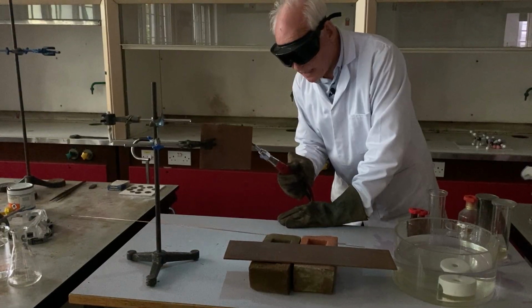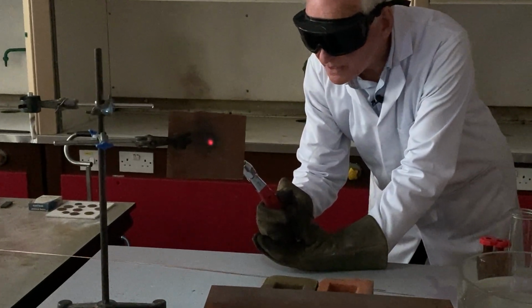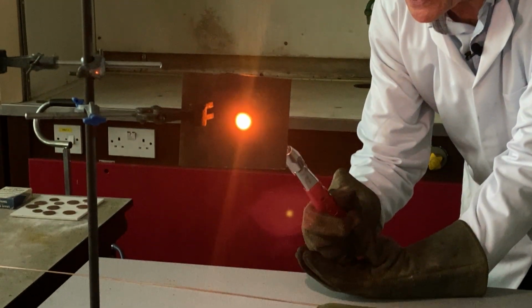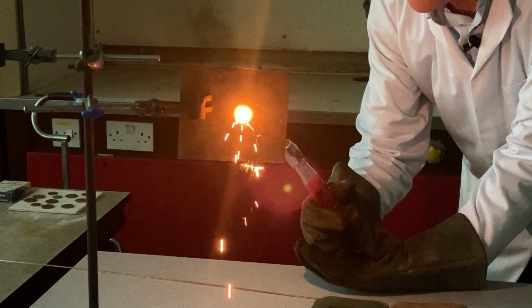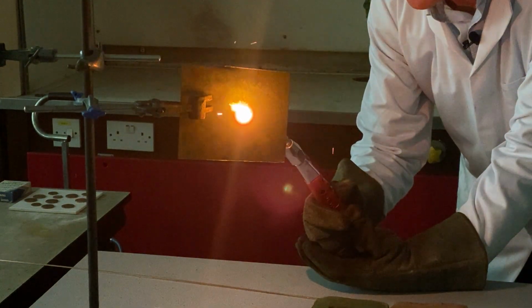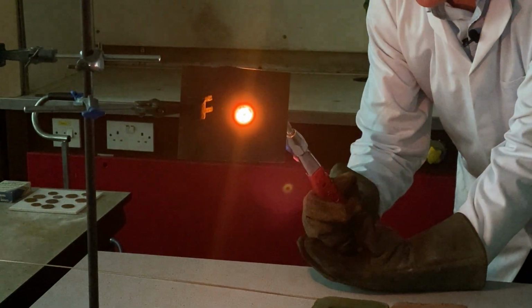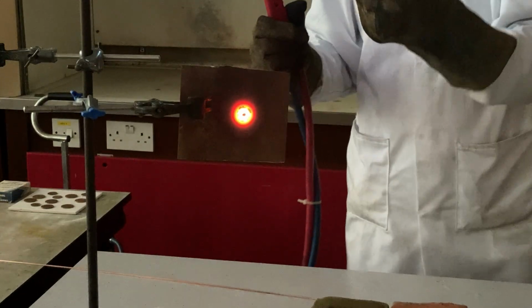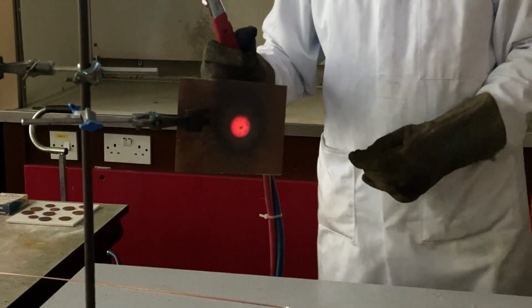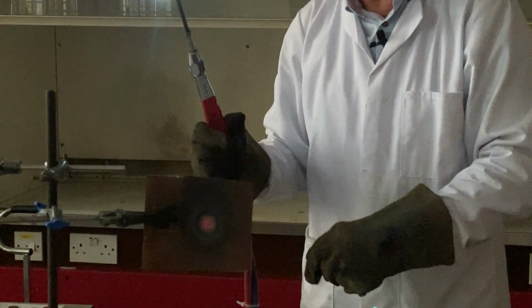Now, I'm going to heat it approximately in the middle, and as I start heating it, I hope you'll see it will start to glow orange. And as it starts to glow orange, you see I've already burnt the hole. There it is. And the hole has come through very quickly indeed. Now those are sparks. The sparks which are coming off are sparks of burning iron, in fact. It's iron burning in air, this shower of sparks, to make triiron tetroxide, Fe3O4, tiny little sparkles.